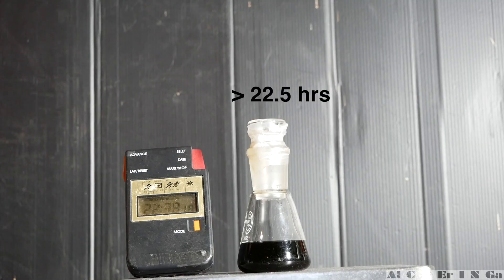After 22.5 hours, again the mixture's color hasn't changed and there is no other visible reactions taking place.